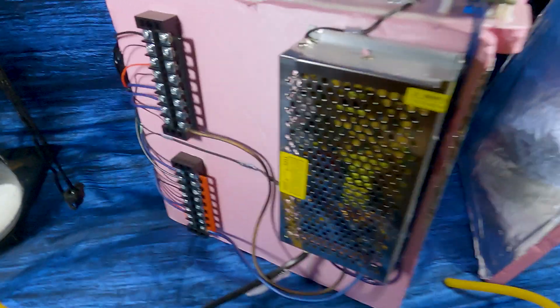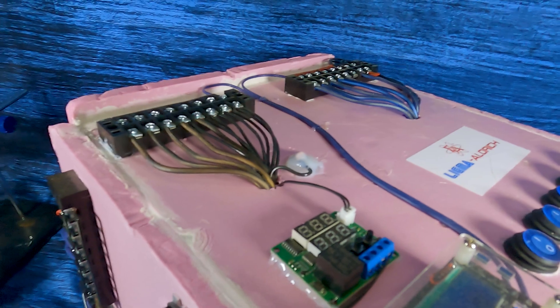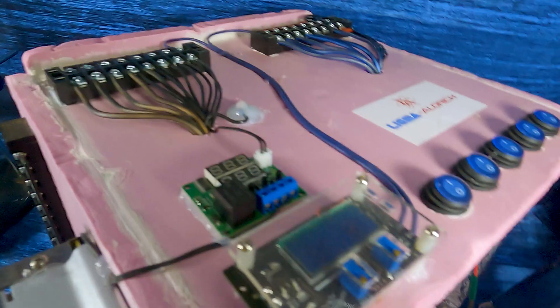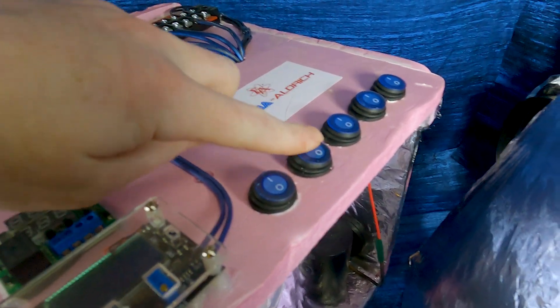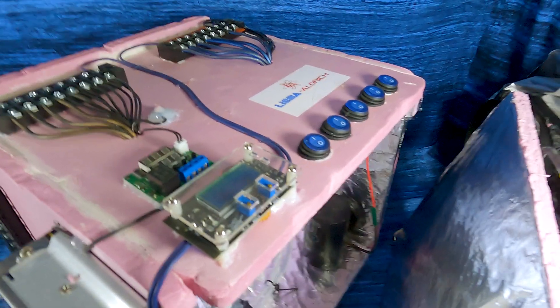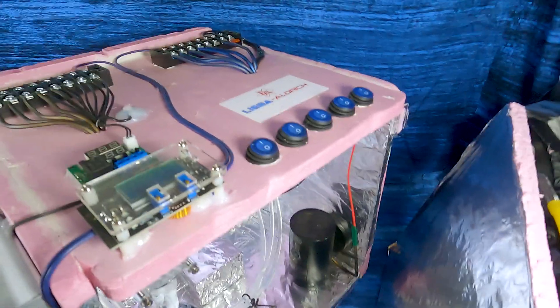Quick rundown: AC power coming in through a 12-volt DC converter to a 12-volt bus, with Peltier module cooling in the back. Then we have a variable voltage bus up here controlled by a buck converter. We have temperature control. We have 254 and 310 nm LEDs — this photo reactor was originally made for Cubane, so 310 nm is our primary wavelength for that synthesis.